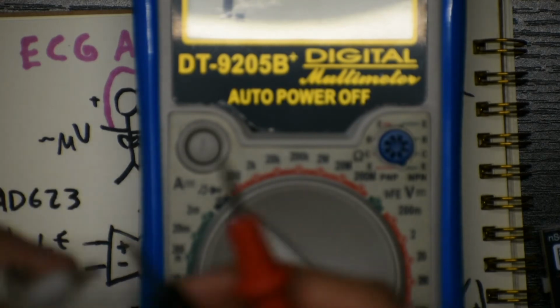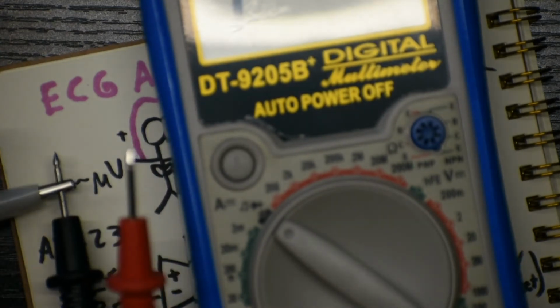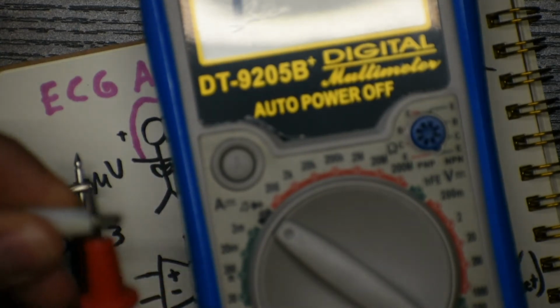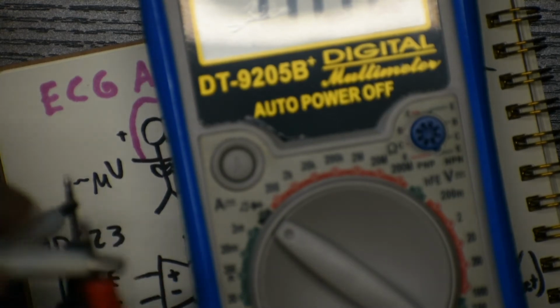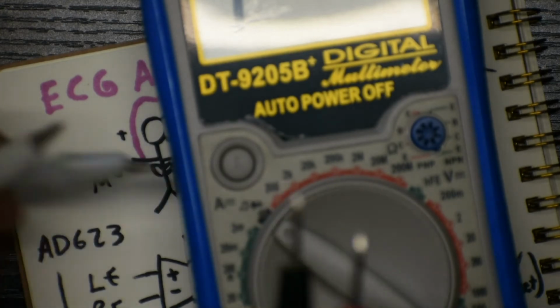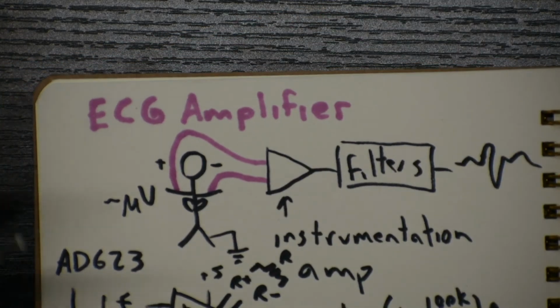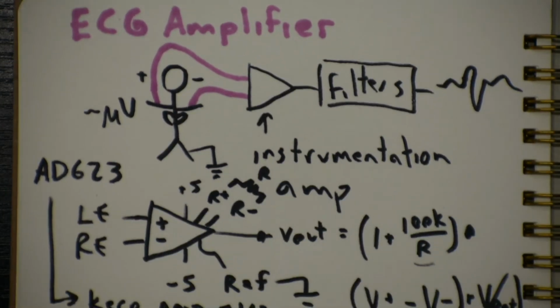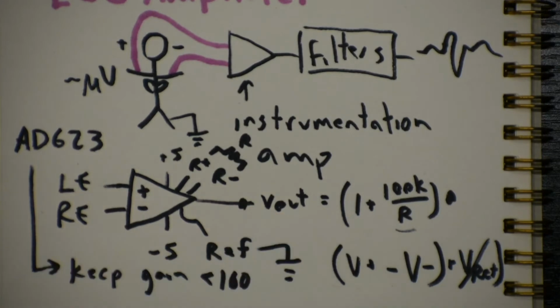And so what I want to do is test to make sure my alligator clip is continuous. So I'll clip both ends to the multimeter in continuity mode. It should beep. And if I jiggle the wires, it should continuously beep. Very annoying. But it shouldn't not beep or be beeping on and off, because that would tell you that your alligator clips may not be continuous. So first, check all of your alligators. Then you can build the first stage of the circuit and take a look at V out on the nscope.